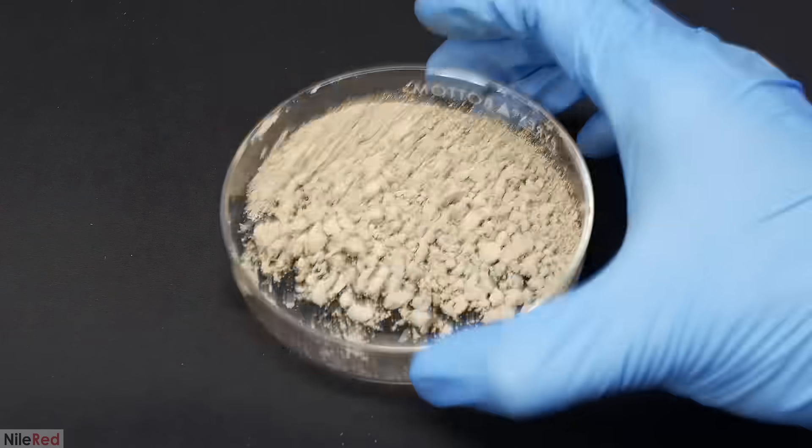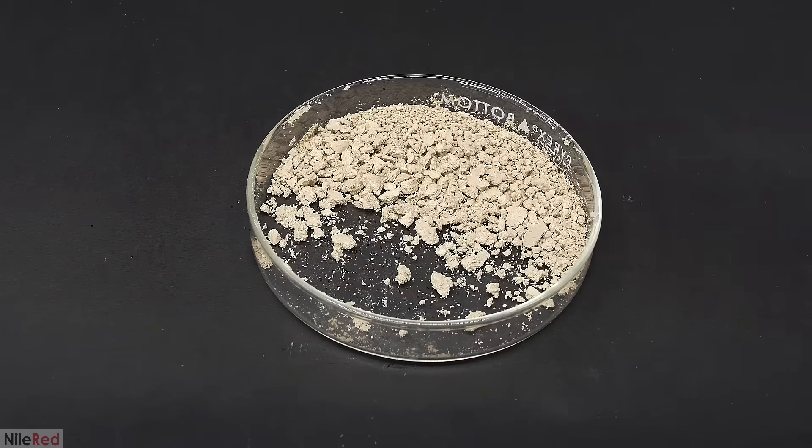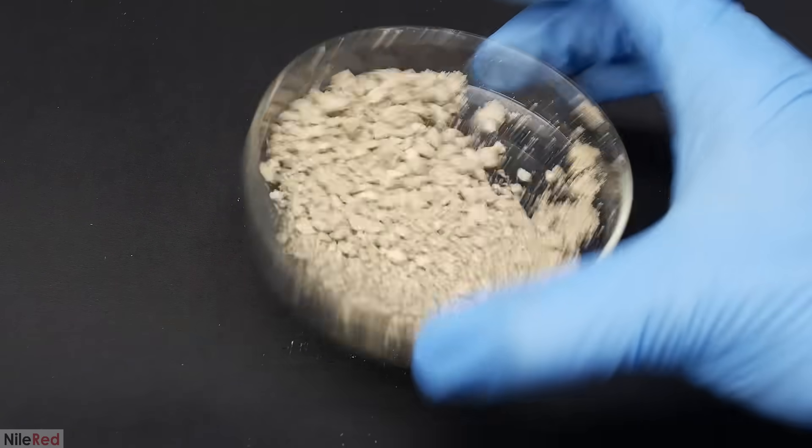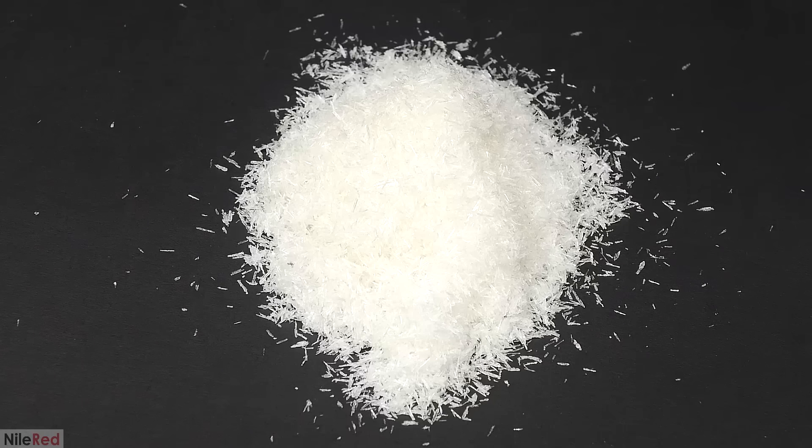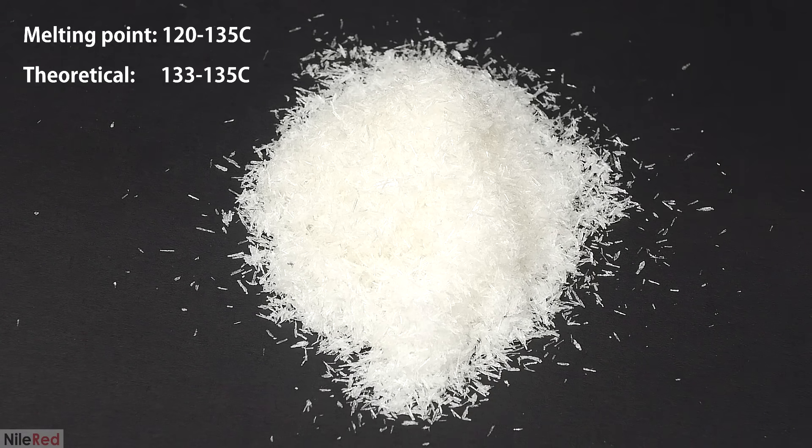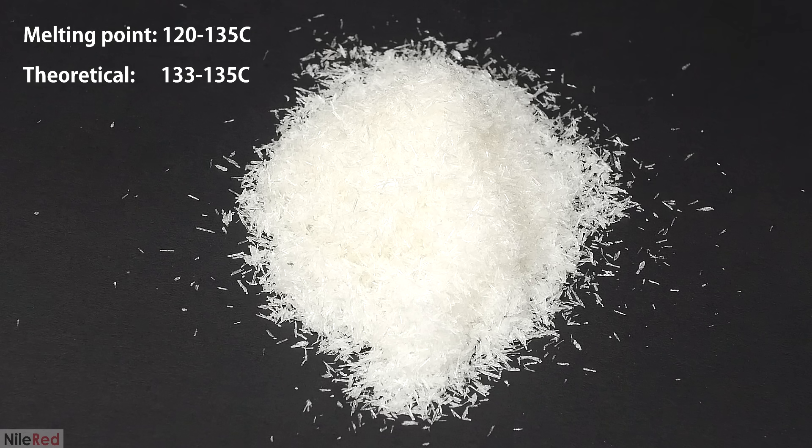I have no idea what I can actually use it for though, so if you guys have any ideas, I'd love to hear them in the comments. Anyway, one final thing that I did was test the purity of the urea. To do this, I measured its melting point, and I got a range of 120 to 135°C.